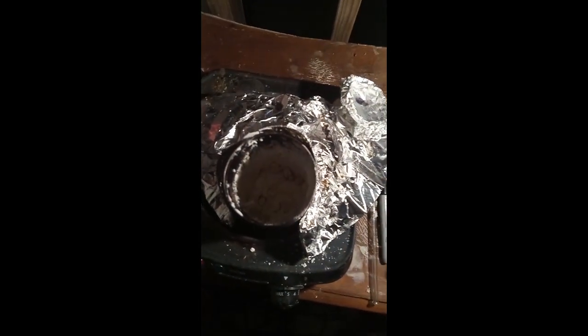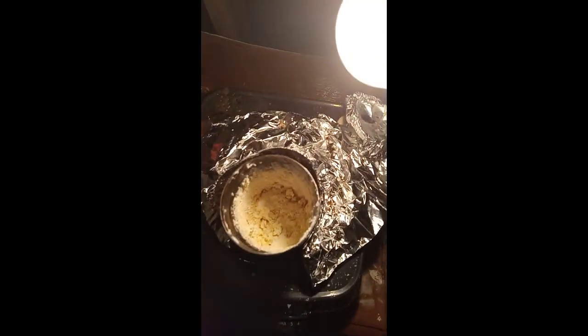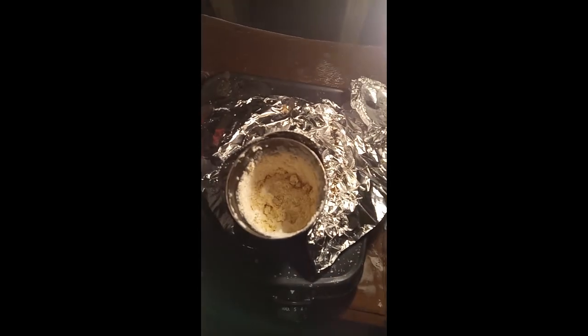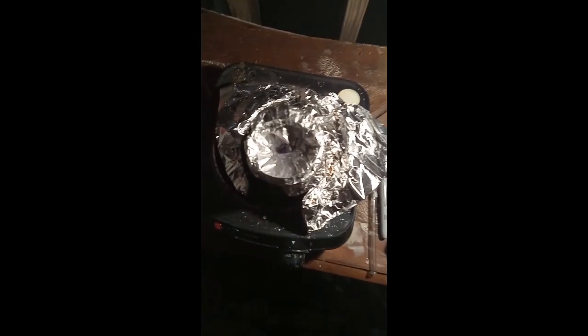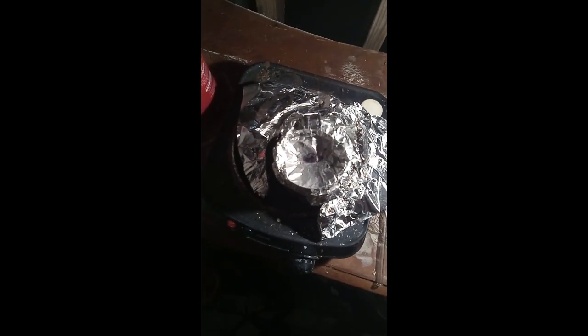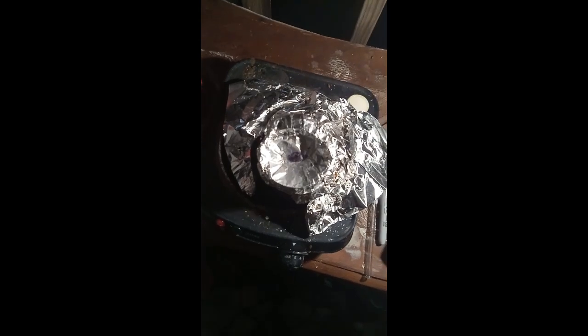It's 3 o'clock in the morning, so we're done. And it took a lot longer than I expected to come up to temperature. It's sort of a pale brown color. I don't know if you can see that. It's kind of dark in here. It's like a pale browny yellow. I'm colorblind, so take that with a grain of salt. But yeah, we're done. So we'll let that cool down. The reaction's done, at least. And we will wait till tomorrow and chip it out of the can, and I will get back to you.